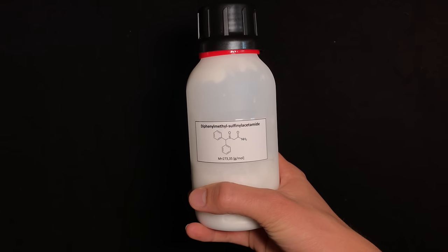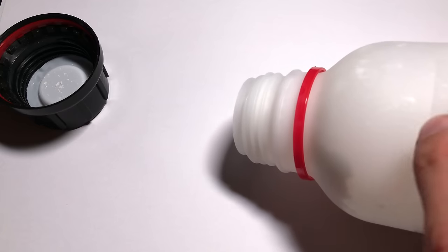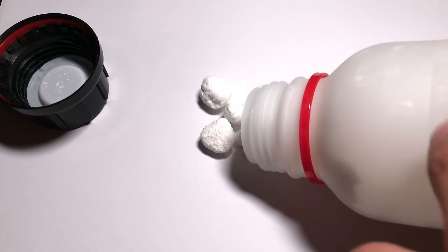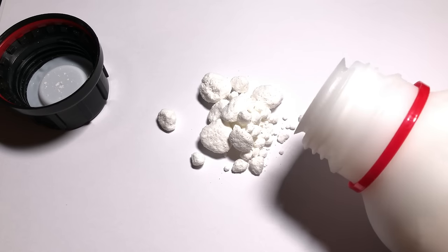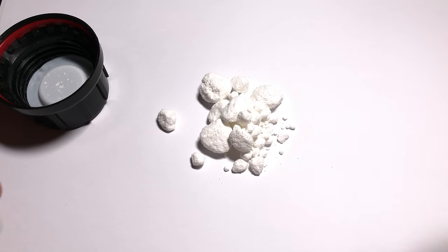This is Modafinil. It's a narcolepsy medication, but it's also a very popular nootropic. I'm going to show you how to make Modafinil, because I think that the procedure is rather interesting, and therefore I'm going to do it.